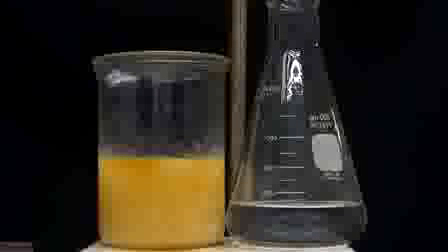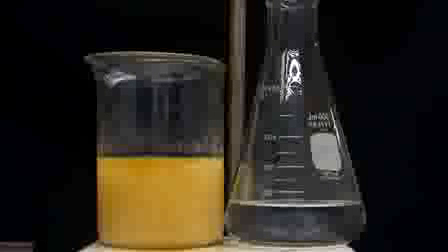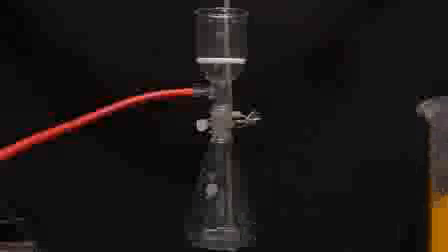To make sure that all of the methylamine hydrochloride dissolved, I went ahead and heated the solution. This will make sure that all of our product is in solution, but it will also increase the amount of ammonium chloride contamination that we get. Once we get near the boiling point of the methanol, we can filter things off, and I'll just say here that it's really not smart to do a vacuum filtration. I was a little bit lazy and didn't feel like doing a proper hot filtration, but you'll see here immediately why that's a problem.